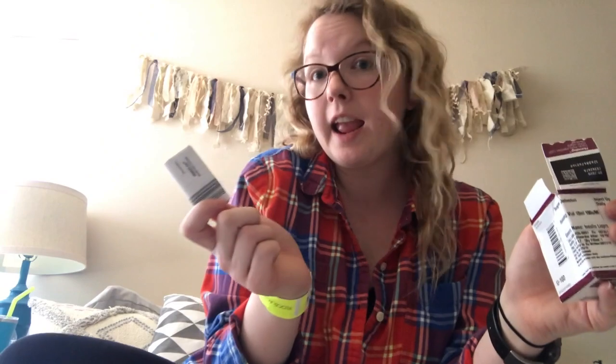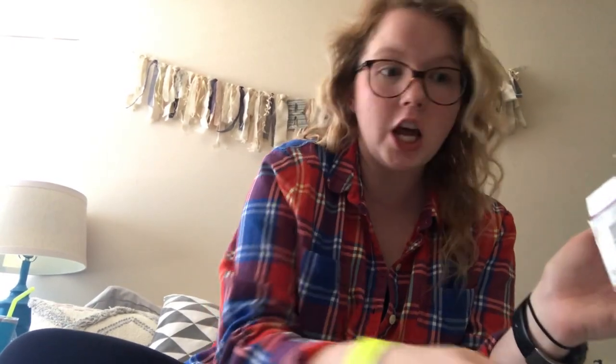A brand new vial will always have this cap on it — you can't reuse the cap but you just flick the cap off. Then you have your sponge spot there to put your needle in and draw back. I always fill the syringe with air first.